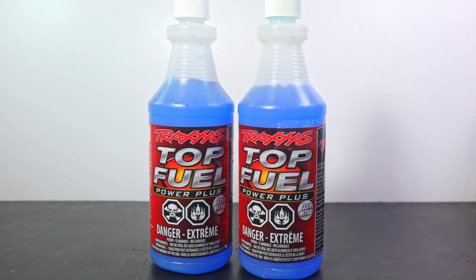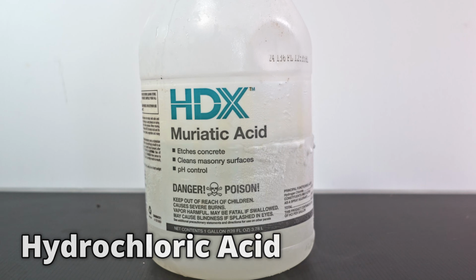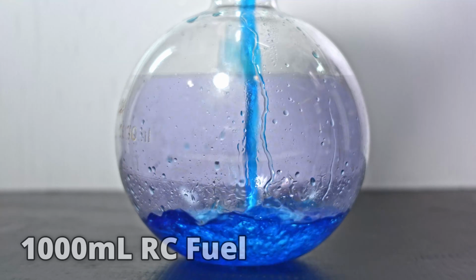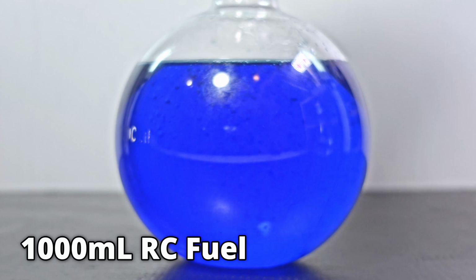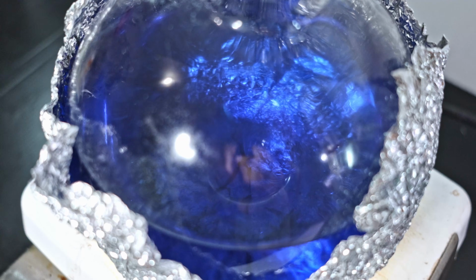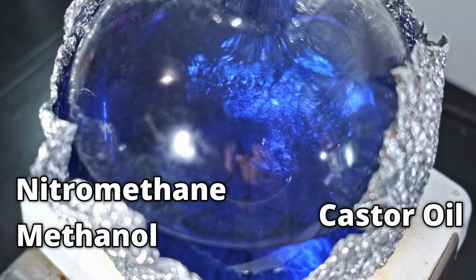The materials you'll need are RC fuel, hydrochloric acid, and methanol. The first thing I'm going to do is pour 1000 milliliters of RC fuel. I start with a hard distillation just to separate the volatiles, being nitromethane and methanol, from the castor oil.